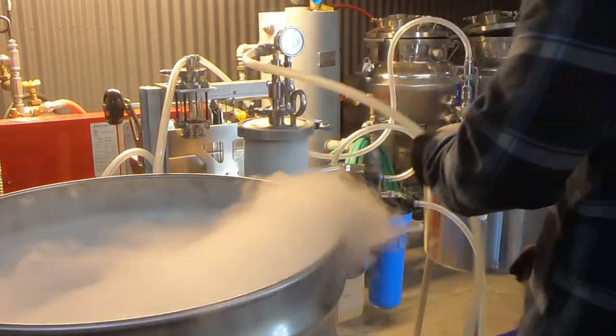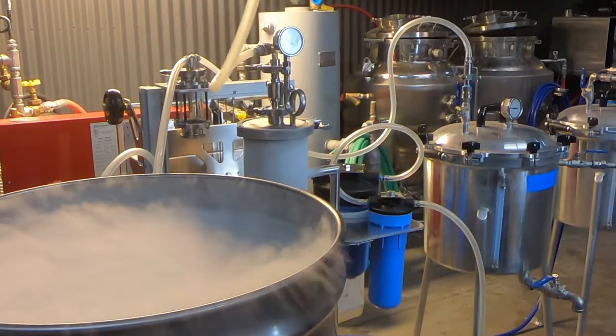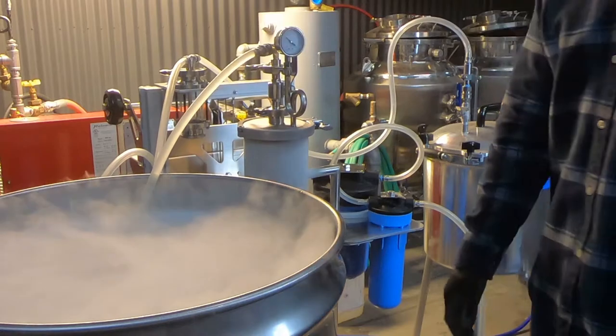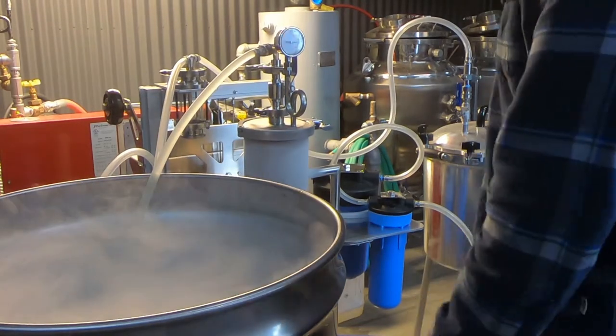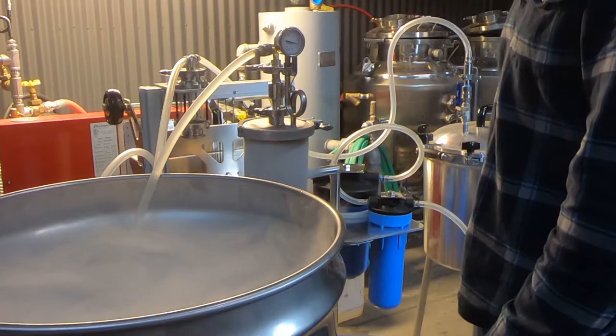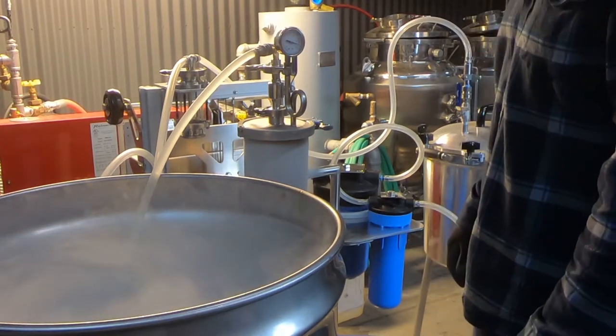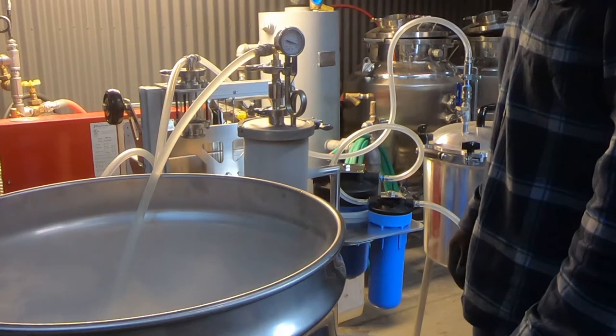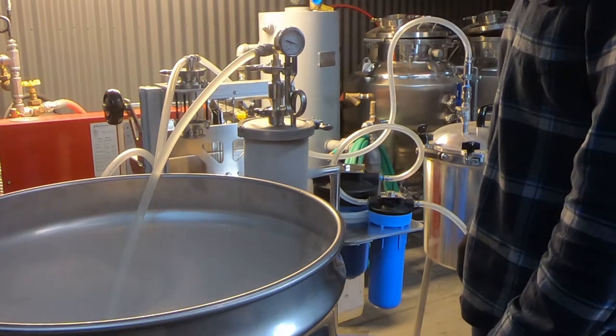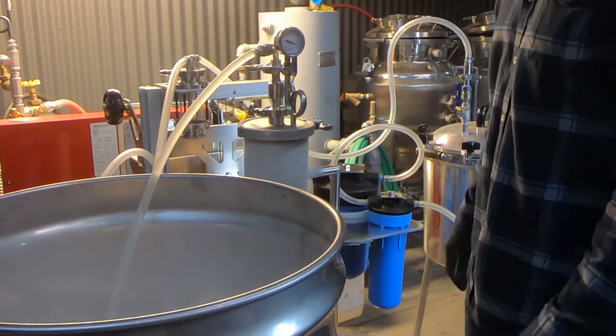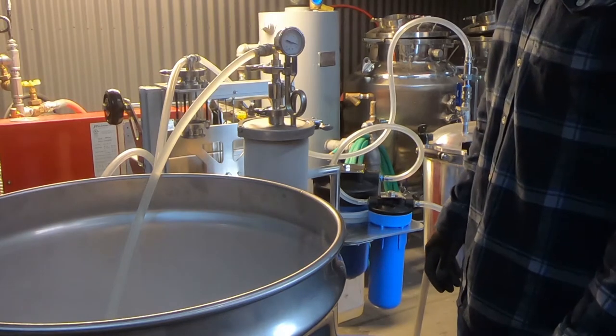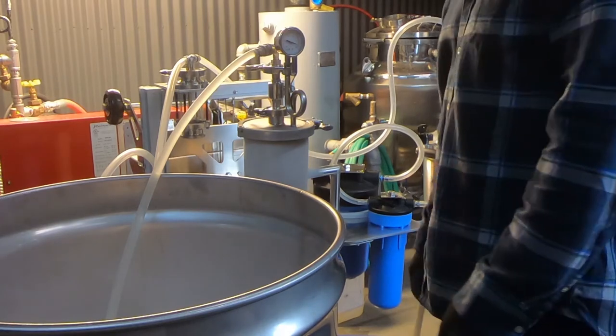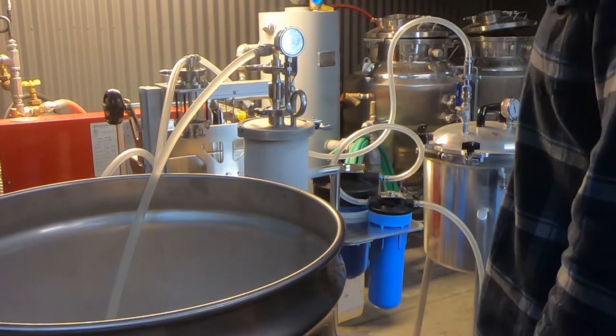That's what I love about the system, we just drop the straw in there, open the valve, and we're good to go. So that's all there is to it. That's how you winterize without a cryo freezer or a chiller, pretty straightforward, easy, affordable. I'll show you guys in another video how to evaporate this without spending a bunch of money as well, and I'll show you the end product that comes out of this too. That's it for now, thanks.